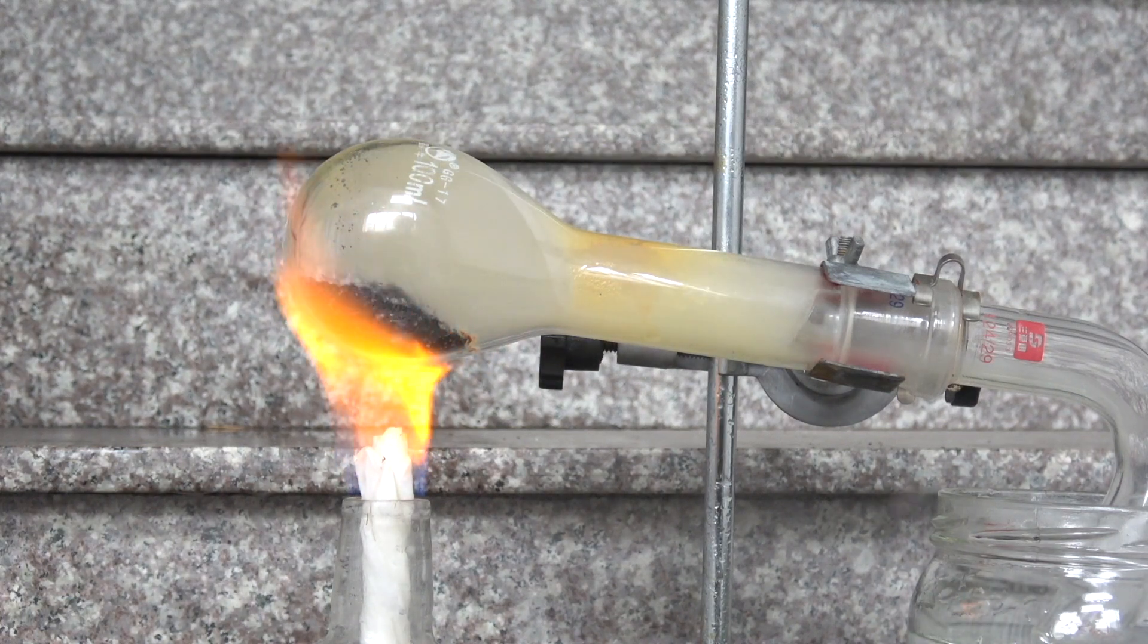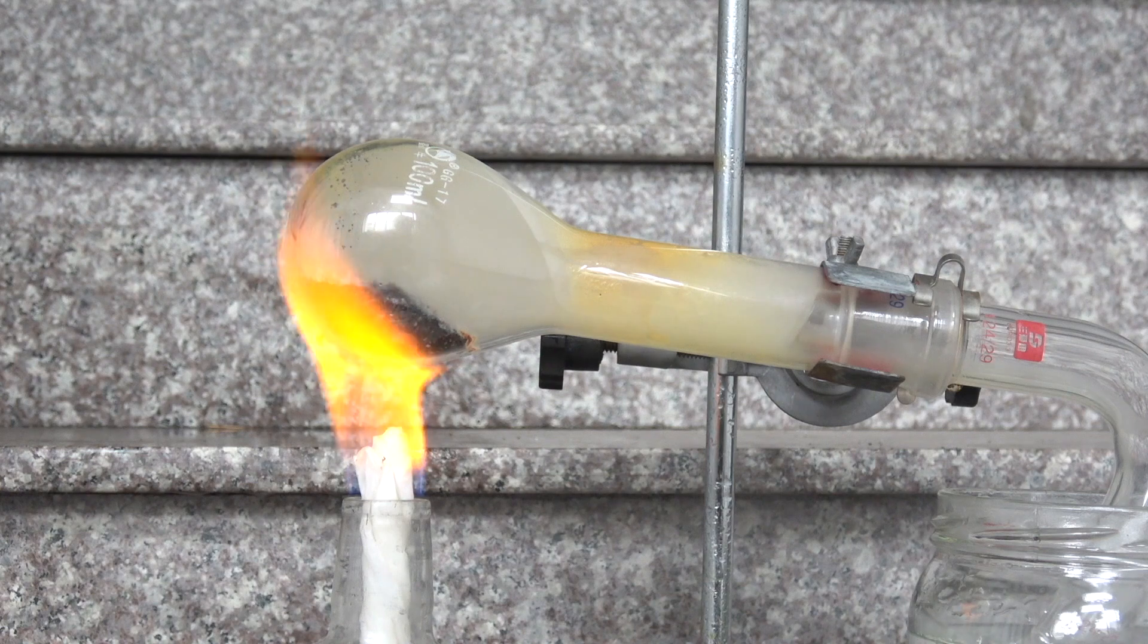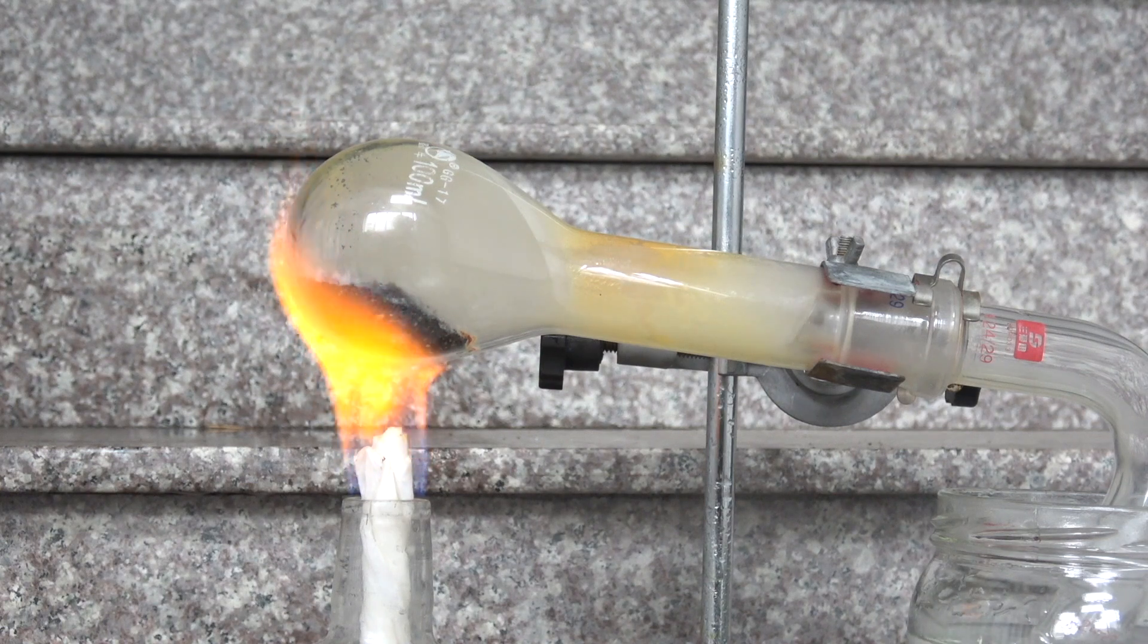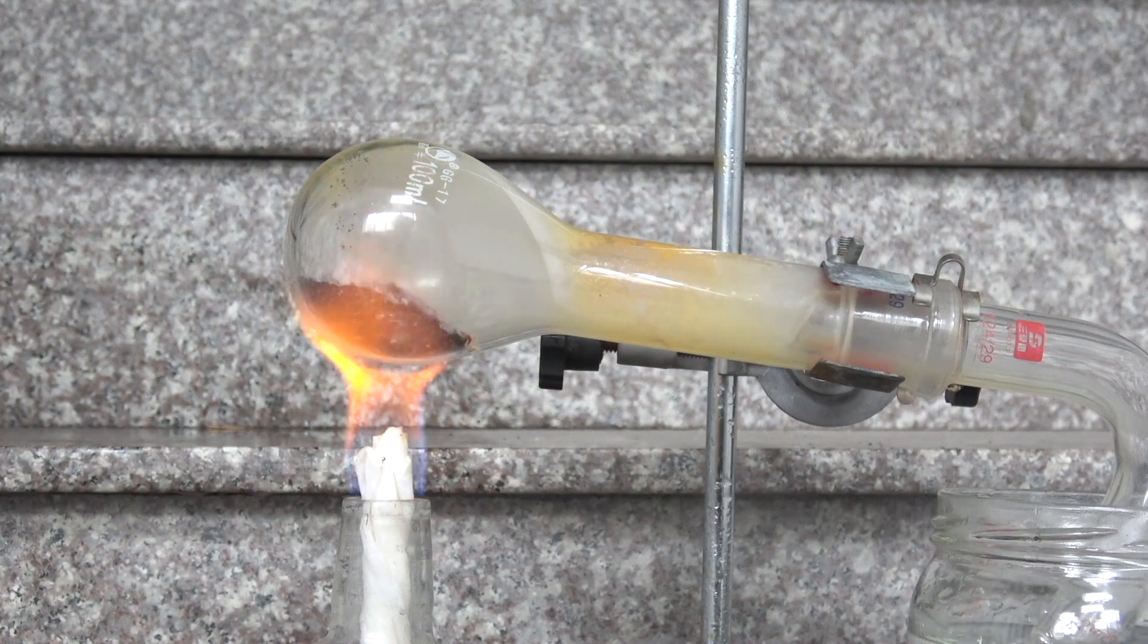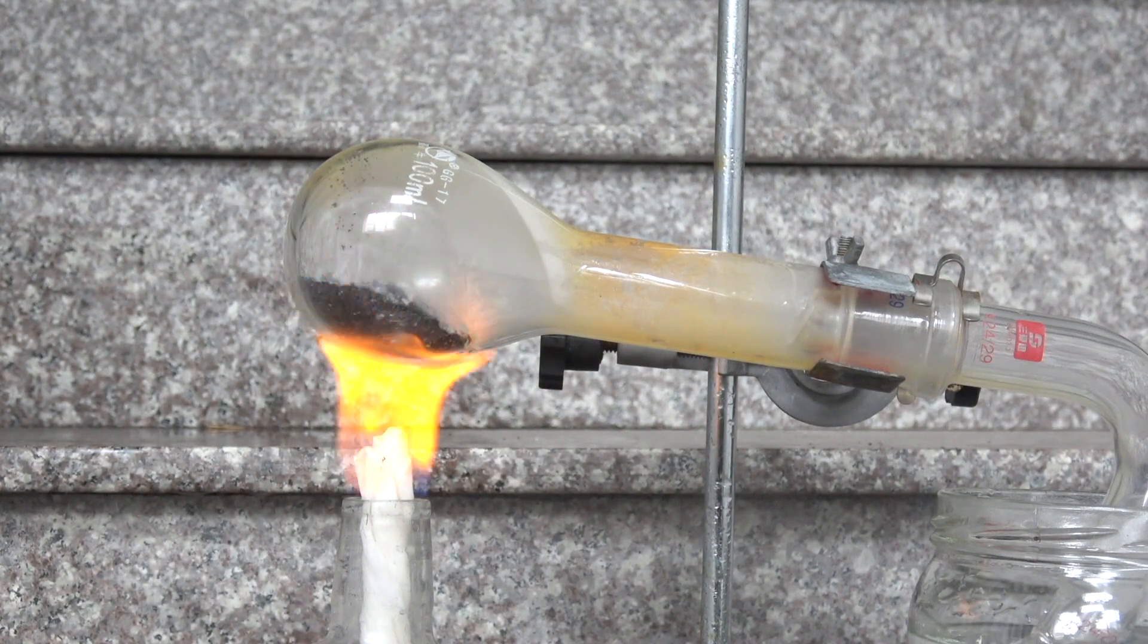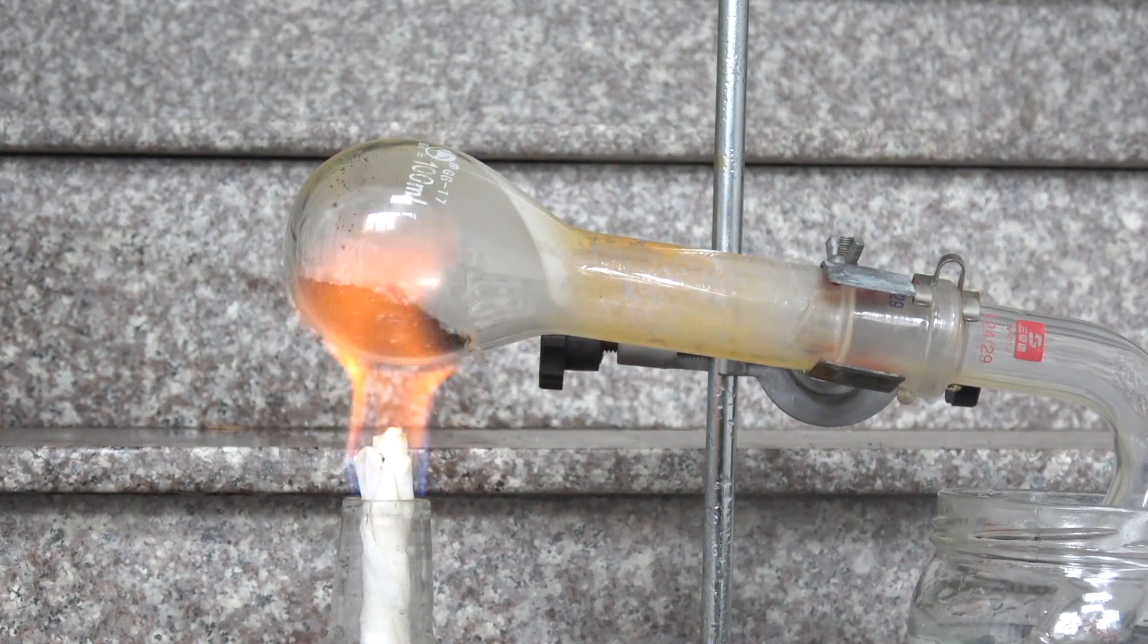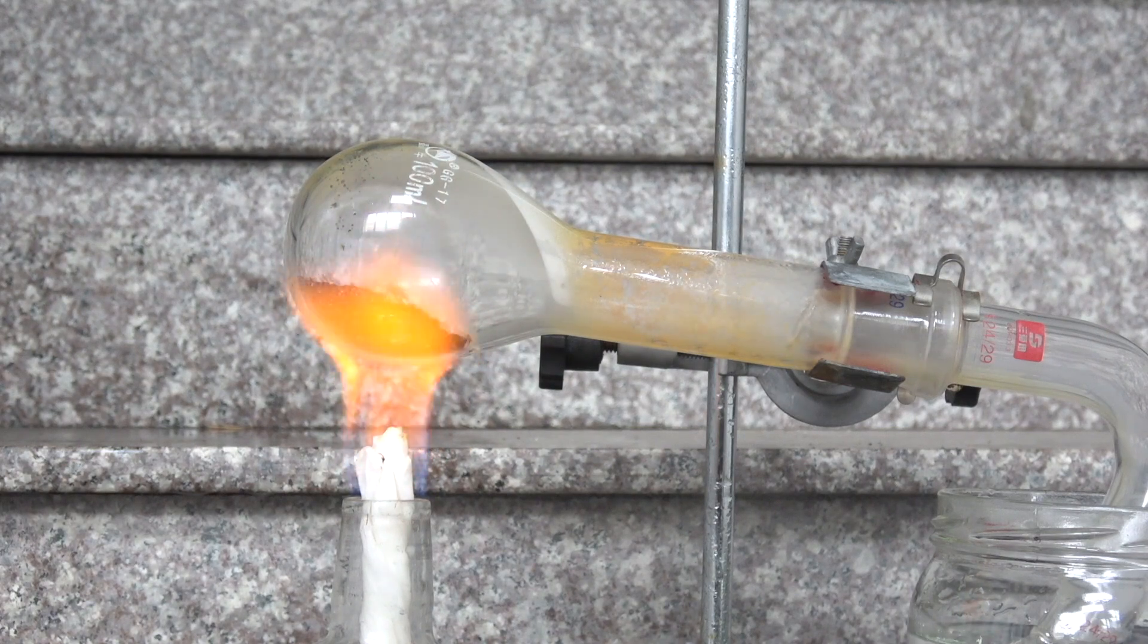However, one way that can prevent this loss of yield is to replace the air in the flask with an inert gas such as nitrogen and argon. I didn't bother because I didn't have any of the gas on hand, and this level of yield loss was acceptable to me.